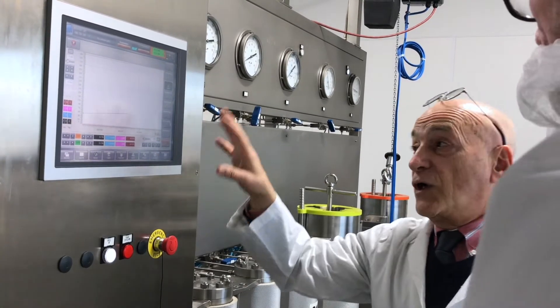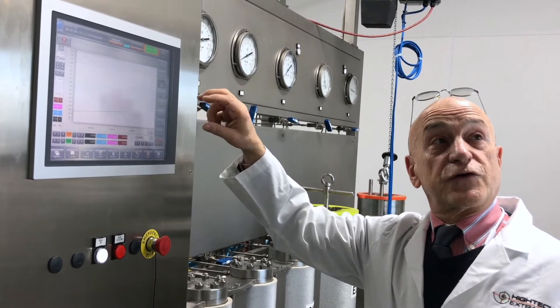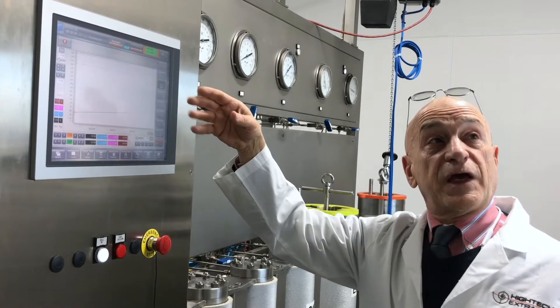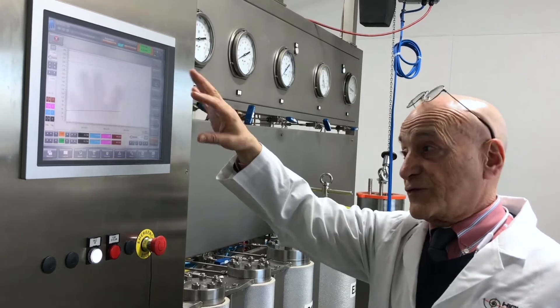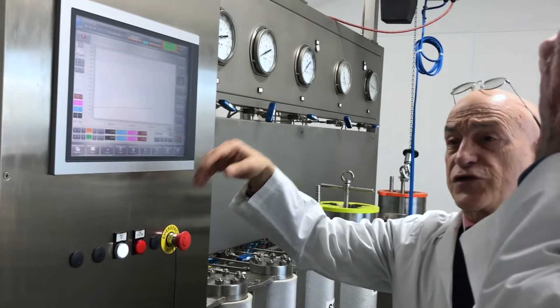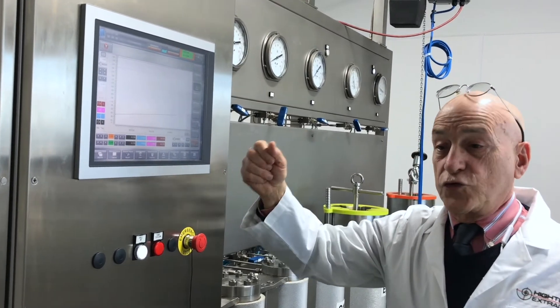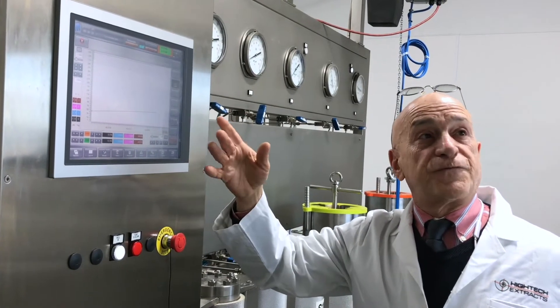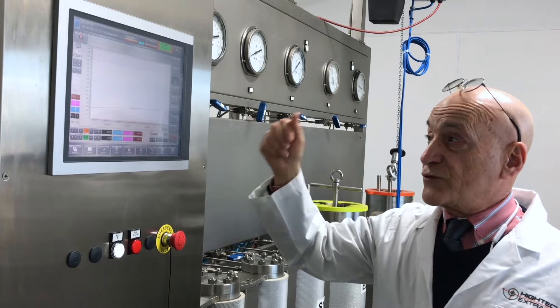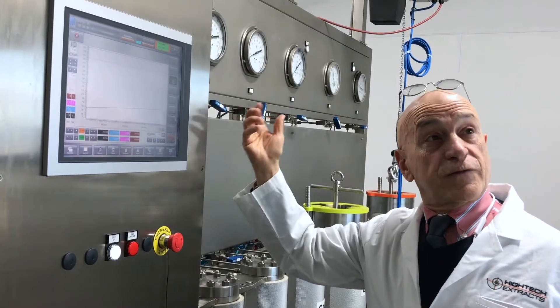The synoptic layout screen shows you exactly what's going on in the system — all the sensor points and all the control points you can access directly. The manual function allows you to enter parameters and do other manual-type functions. Options lets you do a variety of things. Production is for keeping track of your manufacturing — for instance if you were going to do 72 lots of hemp or 15 lots of Skywalker, you put that in and as it runs down over multi-shifts it keeps records and won't overrun the order.